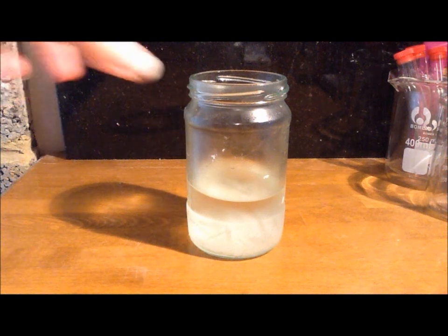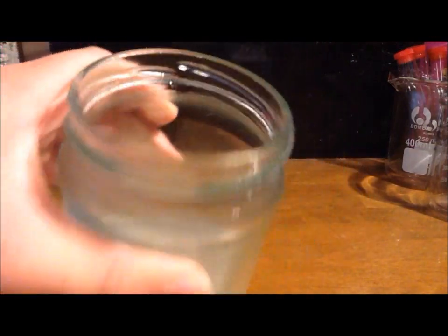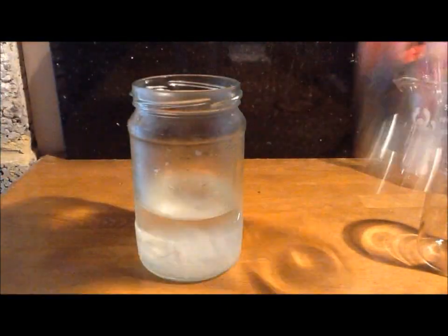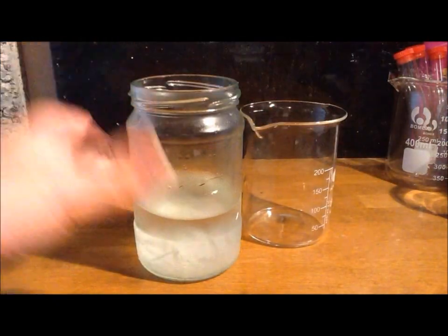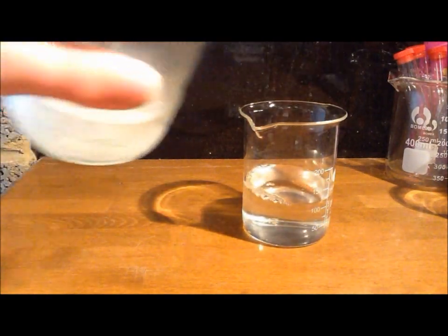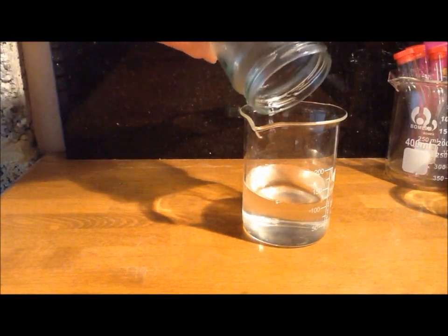Having been in the freezer overnight, you can see a pretty good yield of potassium nitrate at the bottom. We'll get a beaker and decant off the liquid. And there you can see our wet potassium nitrate.